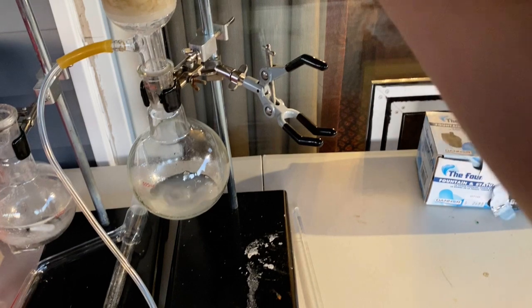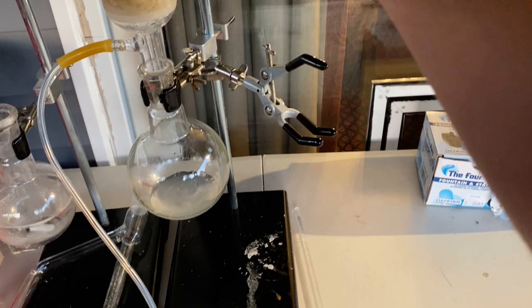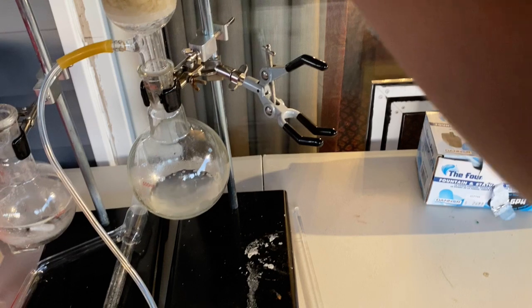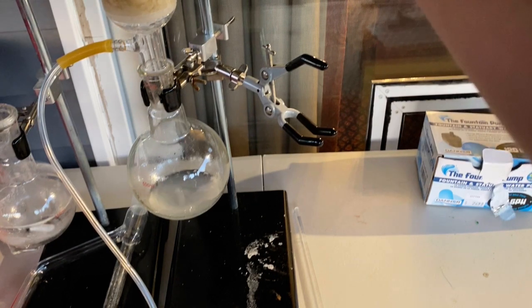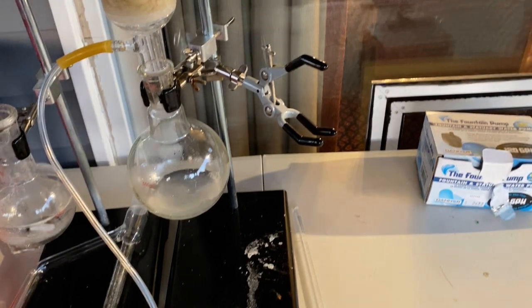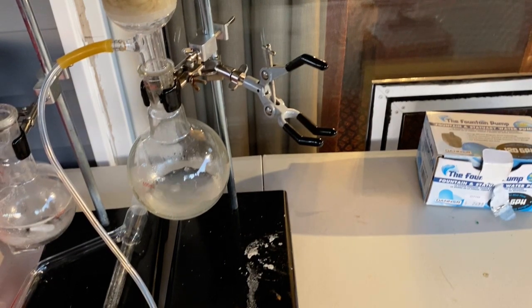And then I'm gonna store it for the meanwhile, and I'm gonna finish off the purification of this by re-melting it on a double boiler tomorrow. Which should be interesting. They say you need a vacuum desiccator for this, but I don't have one. And apparently just using the double boiler is good enough to get it to a slightly technical grade. So that's fine by me.